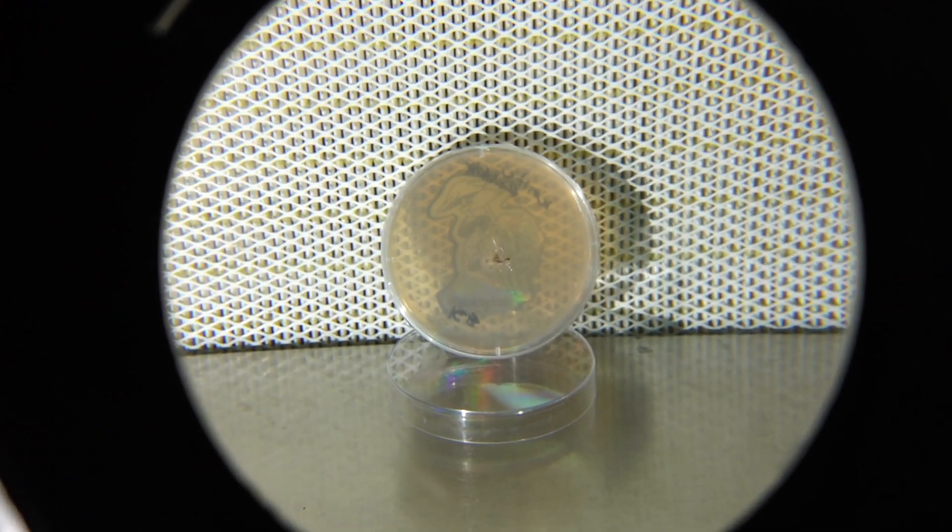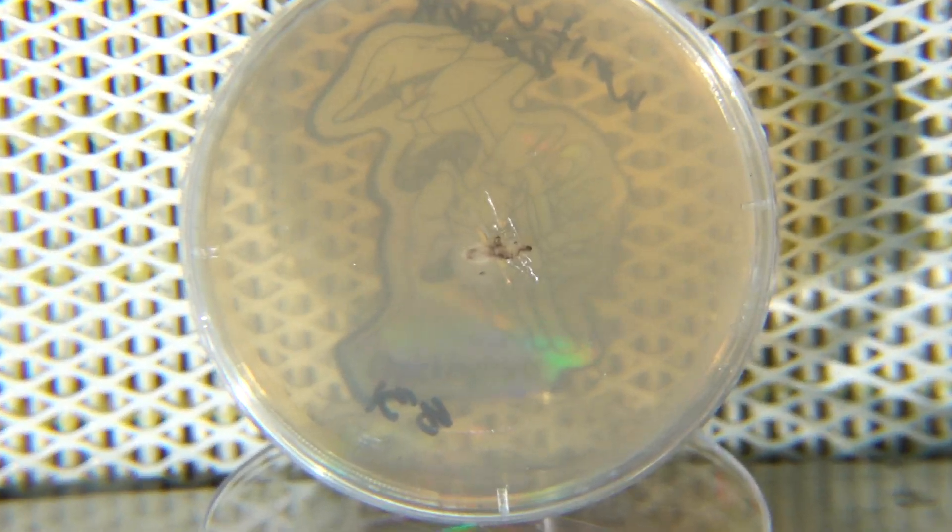This is the third germination within the 48 hour period and this one here is the white rabbit. I am extremely excited about this. A lot of people have reported that the white rabbit multi-spore culture is extremely hard to work with. As you can see the growth here is starting to barely get going. If you remember this from the last video, this was the very last swab that we actually put to agar and the way that we tried to hydrate some of the spores in the sample was to cut a little bit of the cotton and get it really saturated on the agar. A tip that I got from the cultivator who harvested these spores was to actually do that and we had to know their work.